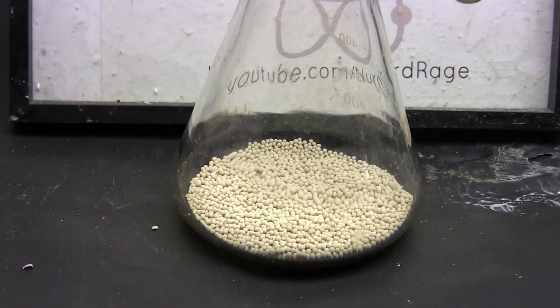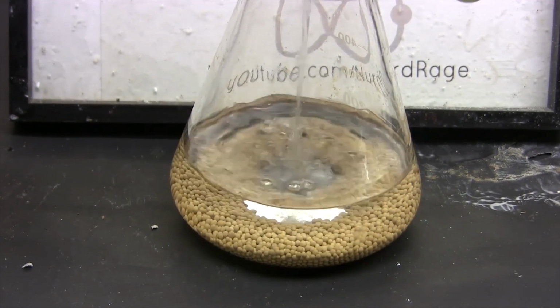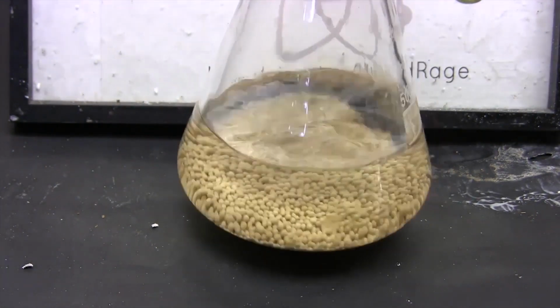Now, in a previous video, I showed that we could use molecular sieves to dry alcohol, and some have asked if that could be used for Fischer esterification. Unfortunately, we can't add the molecular sieves directly because the acids in the reaction would destroy them. Luckily for us, there's a workaround.